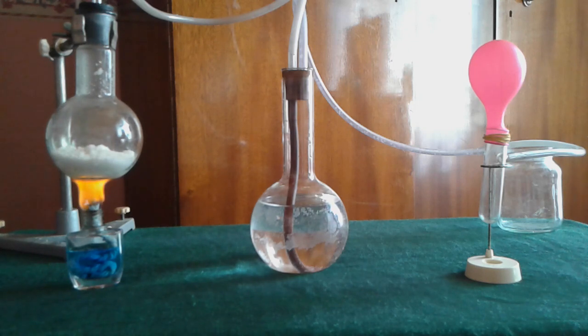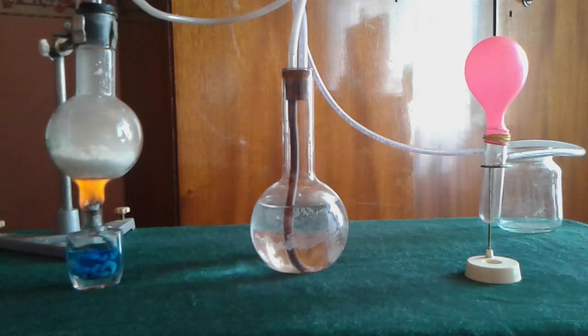There are some impurities and other oxides of nitrogen are formed. For this reason we have to purify the gas and pure nitrous oxide will be collected in this balloon.